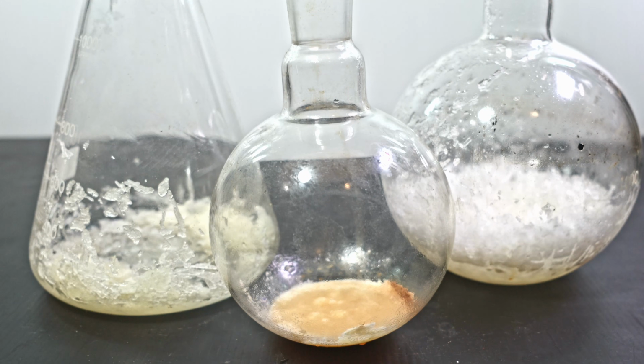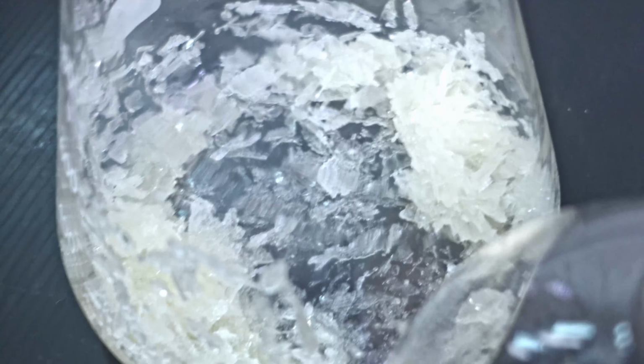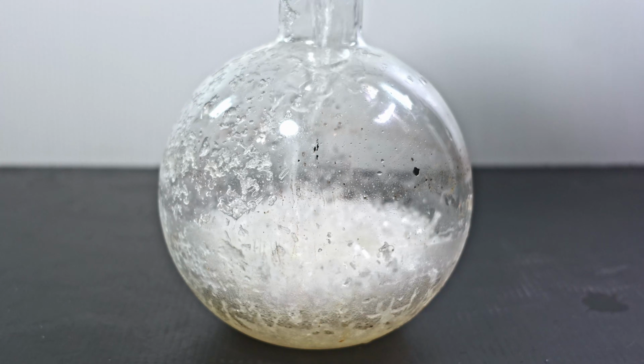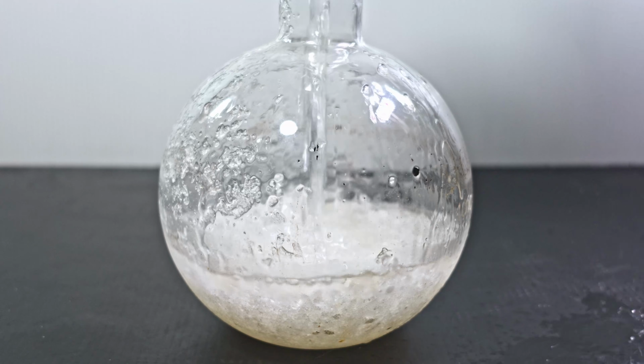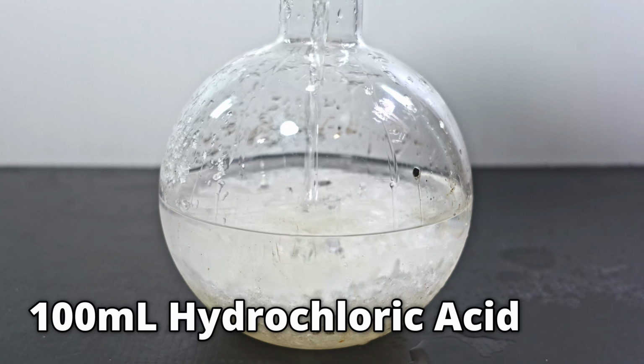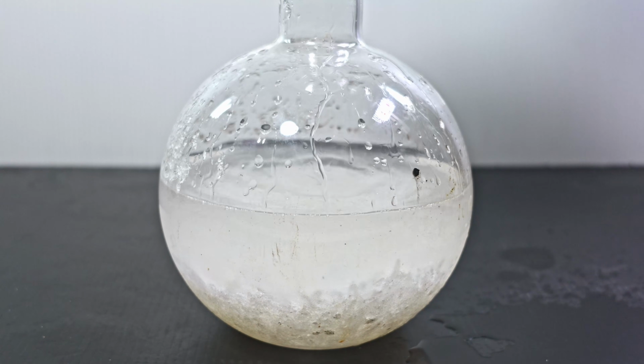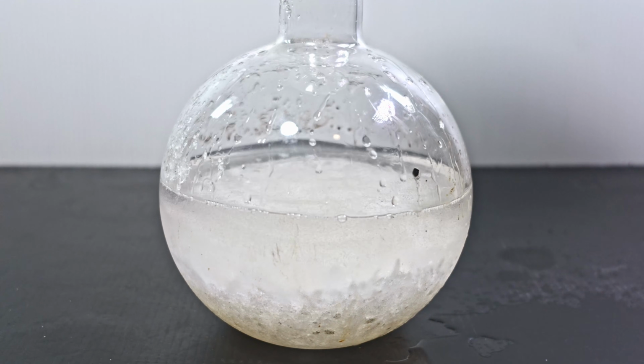And this is my full hydroxylamine salt collection. Don't let the colors fool you though. They're still full of sticky formic acid and hydrogen chloride residue, so I have to purify them. To do this, I'm actually going to use the nitromethane methanol azeotrope I kept around. I add about 400 milliliters of that, plus 100 milliliters of hydrochloric acid just for its water content, and to see if it can react with any of the nitromethane in the azeotrope.